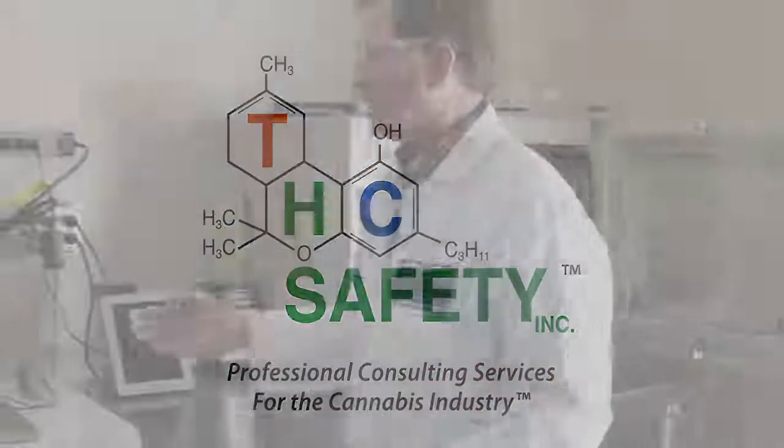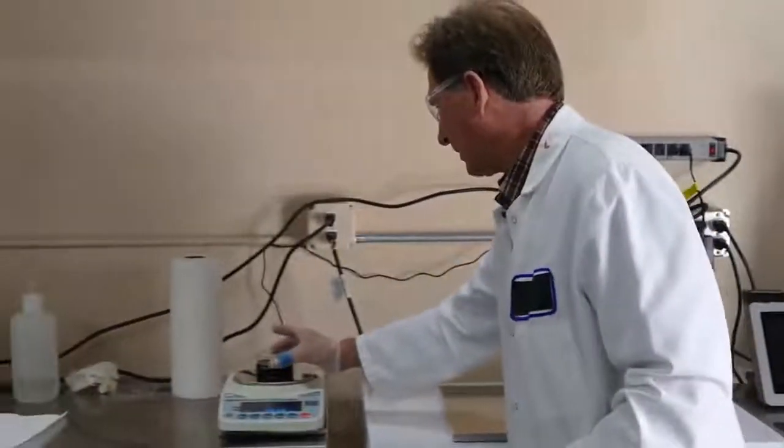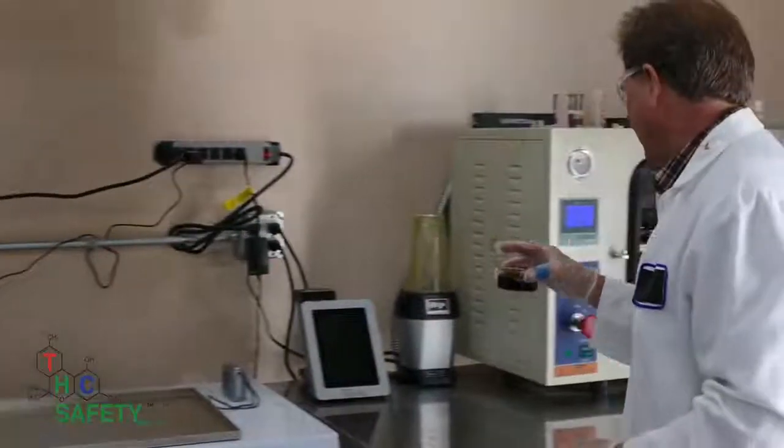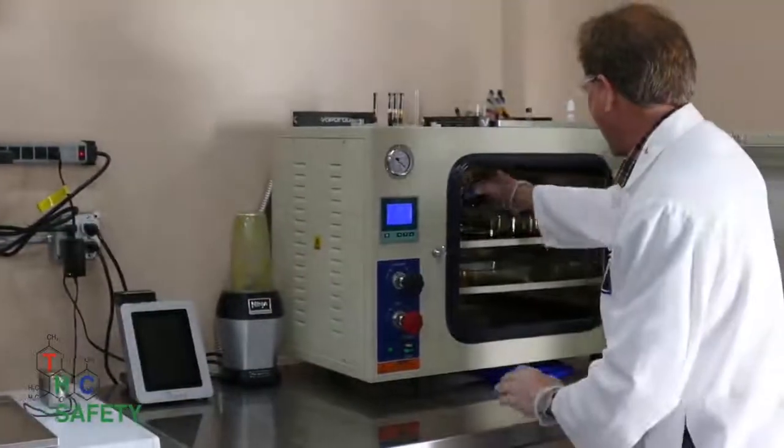So we're going to take our newly harvested material that has a little bit of ethanol, and we're going to place it in our vacuum oven.